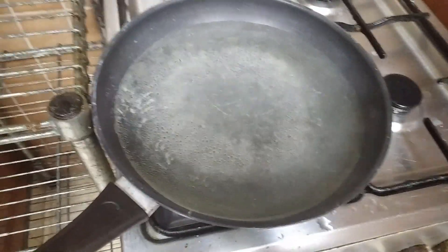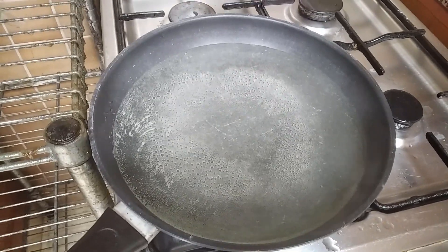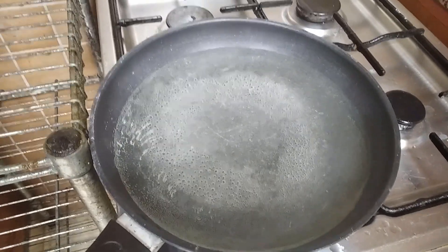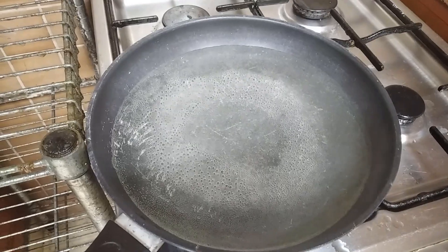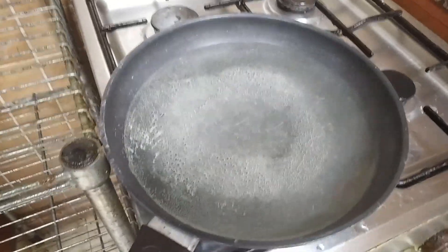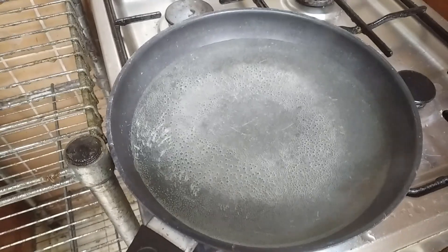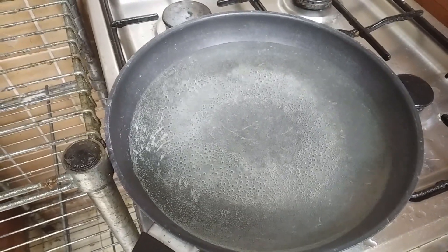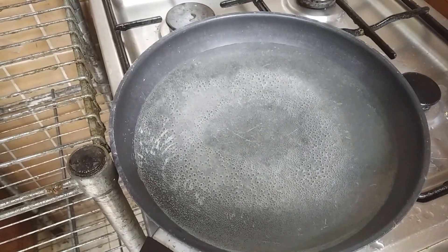Here we are boiling our 98% perchlorate solution. Test the pH before boiling to make sure it is less than neutral - otherwise you're going to eat your aluminum. Because of the magnesium sulfate additive I added before the perchlorate transition, the pH was less than neutral, around 5 to 6, which is good. If it's high like 11, you're going to have to lower it with some hydrochloric acid, or you can use soda water and then filter out any precipitated carbonates.